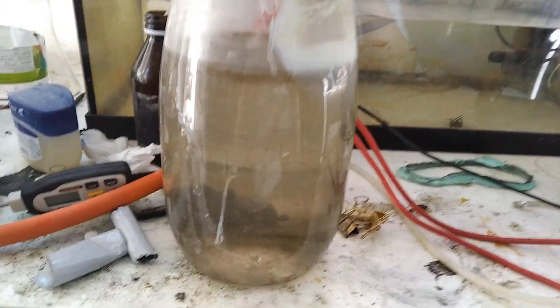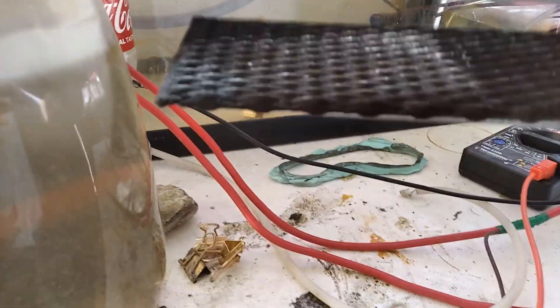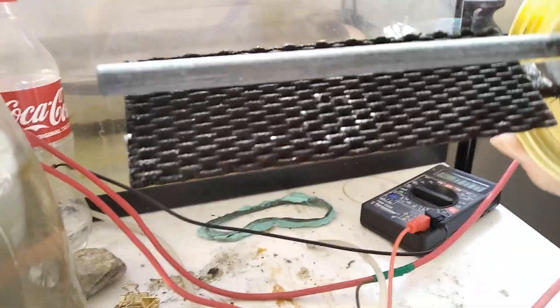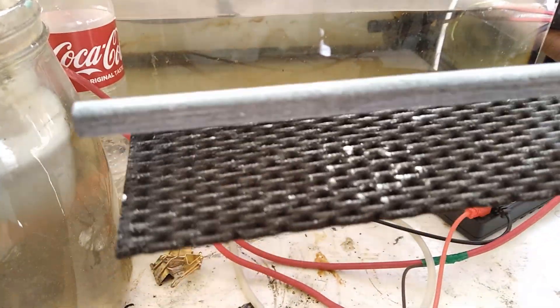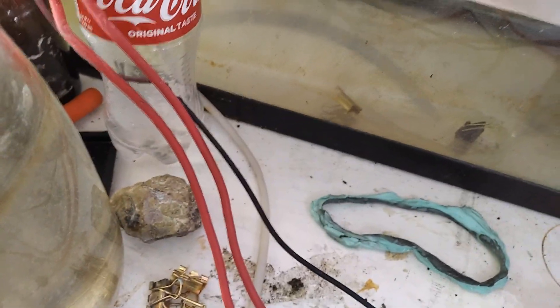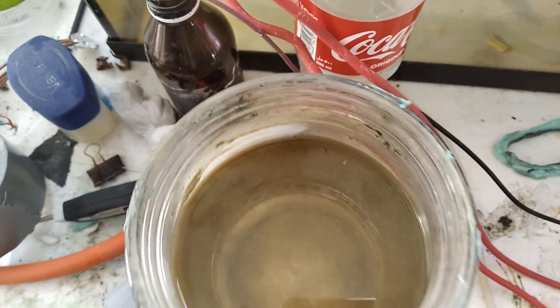This is the cell after running. The water is still mostly clear, however there is micro-erosion on the electrode. The coating is still just as thick as ever. You can see the cathodes are plated with a nice layer of lead, which is to be expected — cathodes. But as you can see, the anode doesn't look very much damaged at all, despite running at the limits of its current density at 204 milliamps per centimeter squared. The solution is pretty much almost pure perchlorate with very little chlorate left.